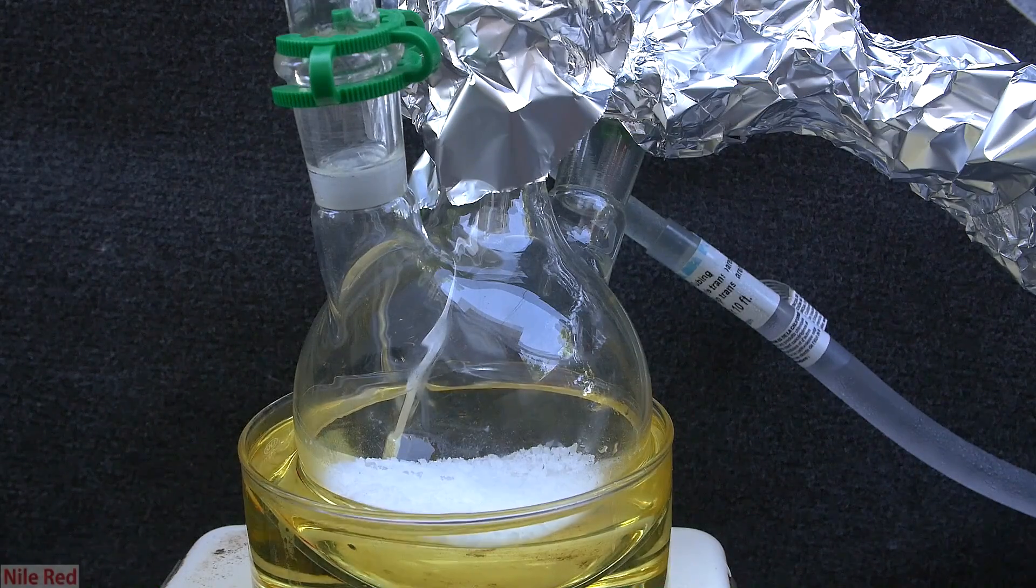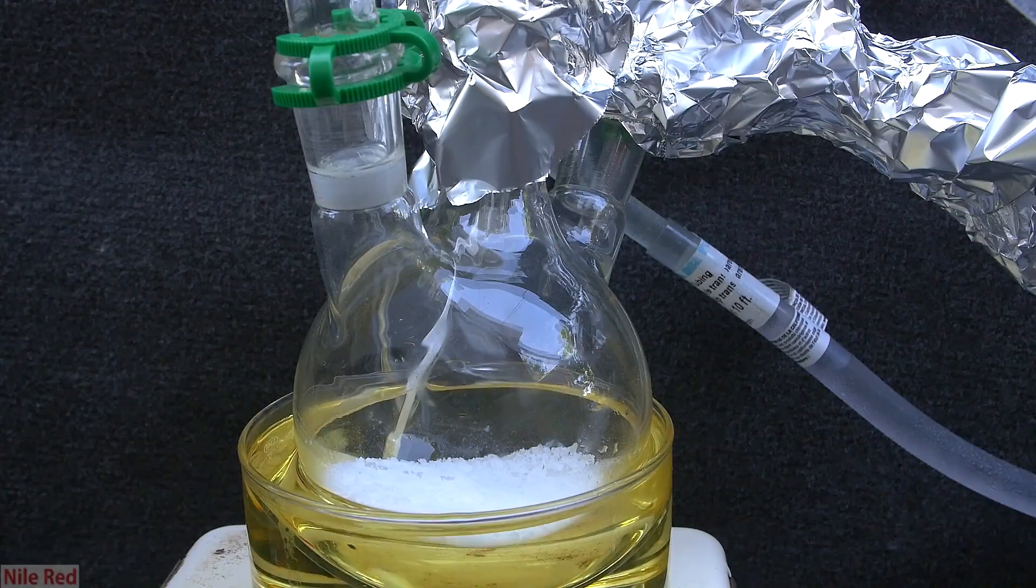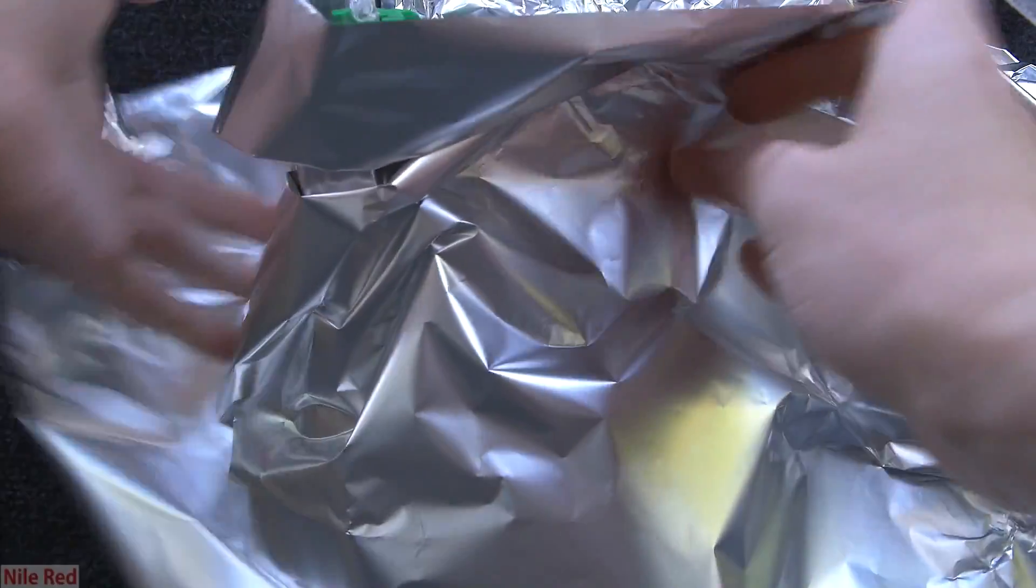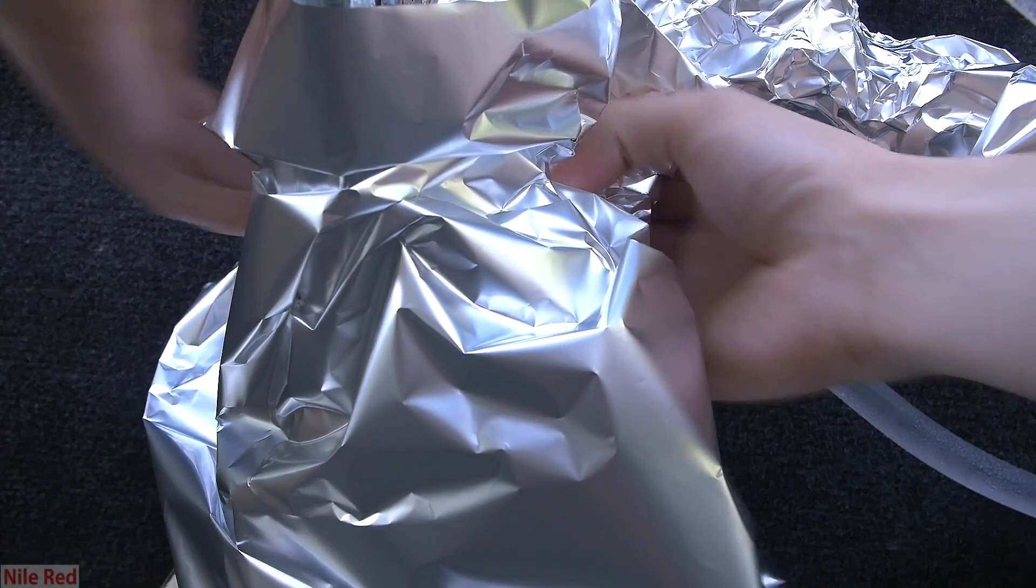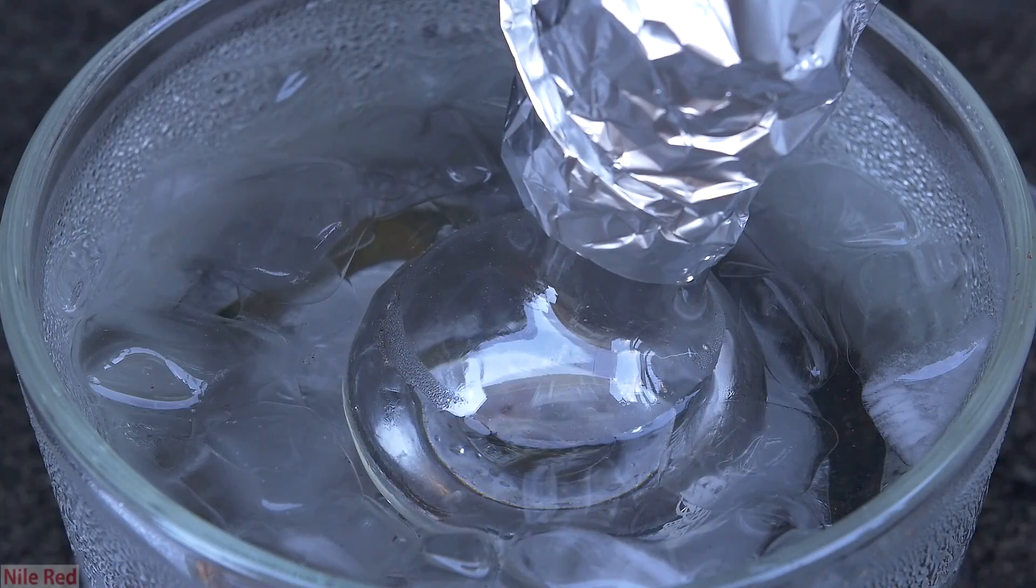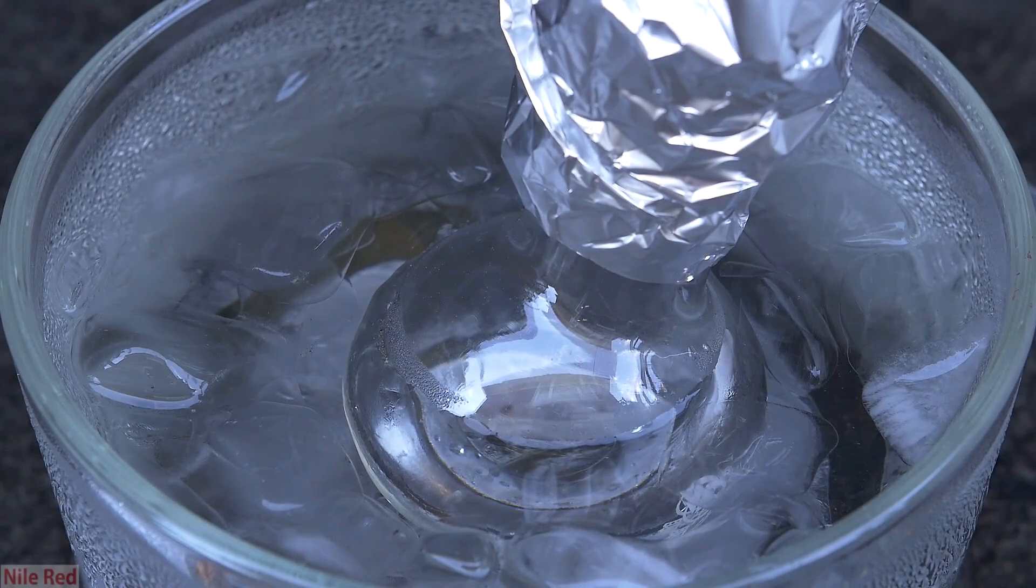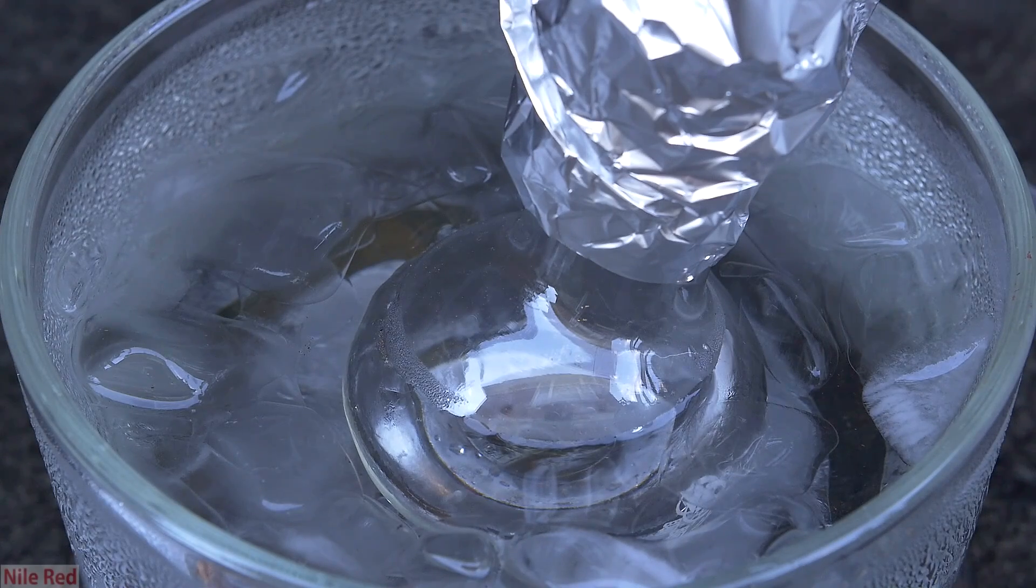At this point, some liquid starts to come over into our salt flask, and I decide to cover it with aluminum foil just to limit any polymerization. We wait a little bit, and not too long afterwards, we actually start to collect some stuff in our receiving flask.